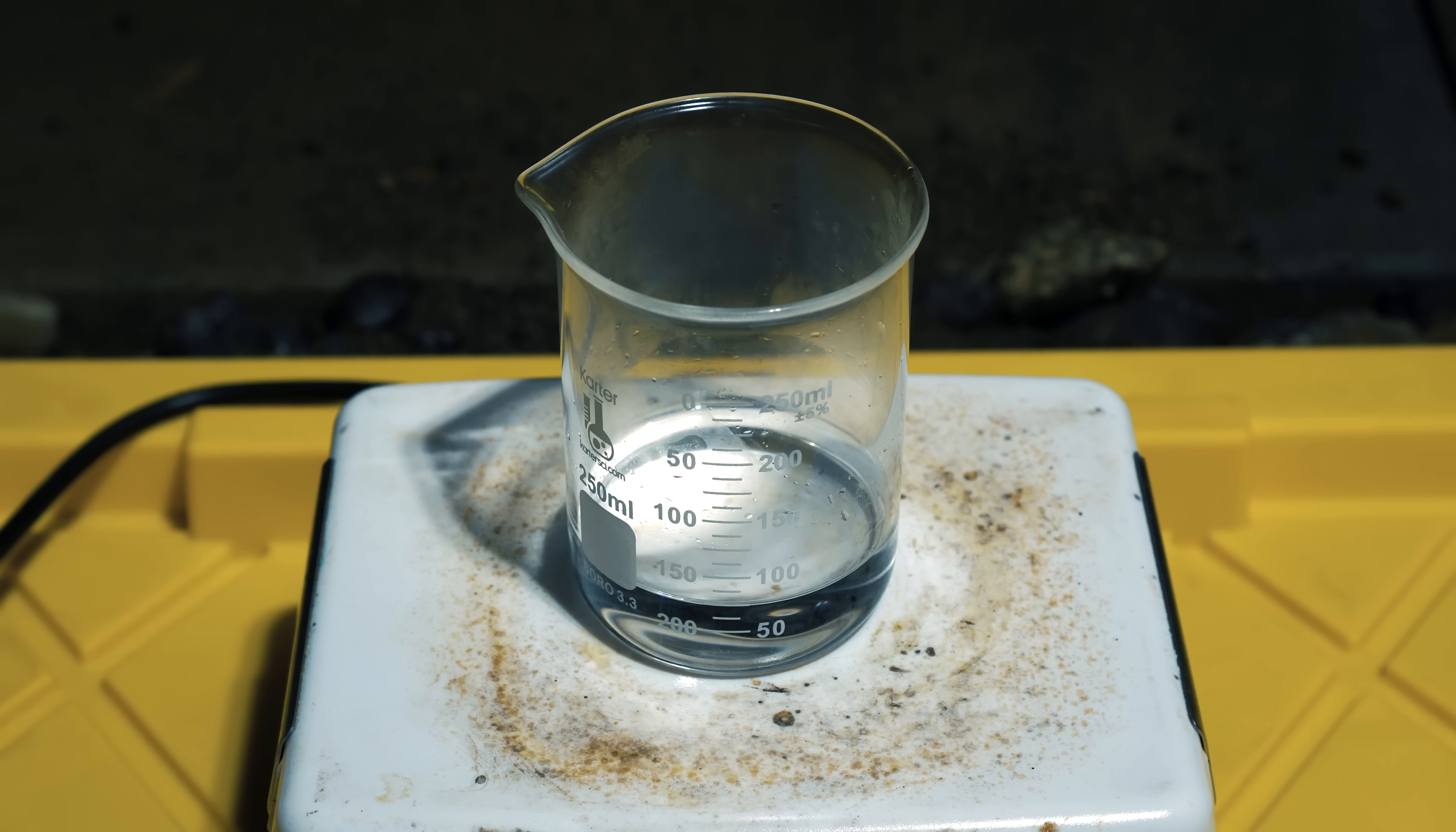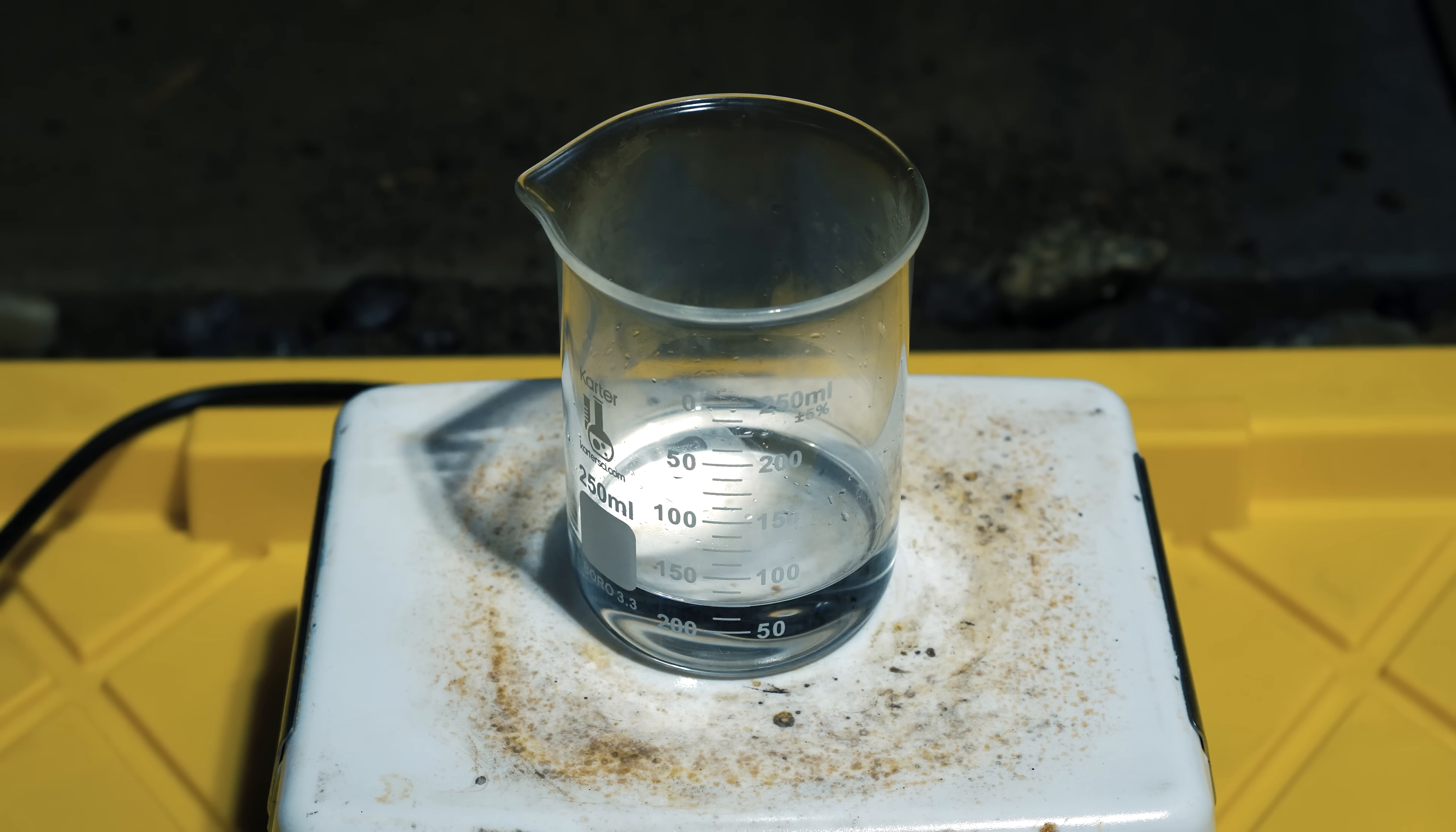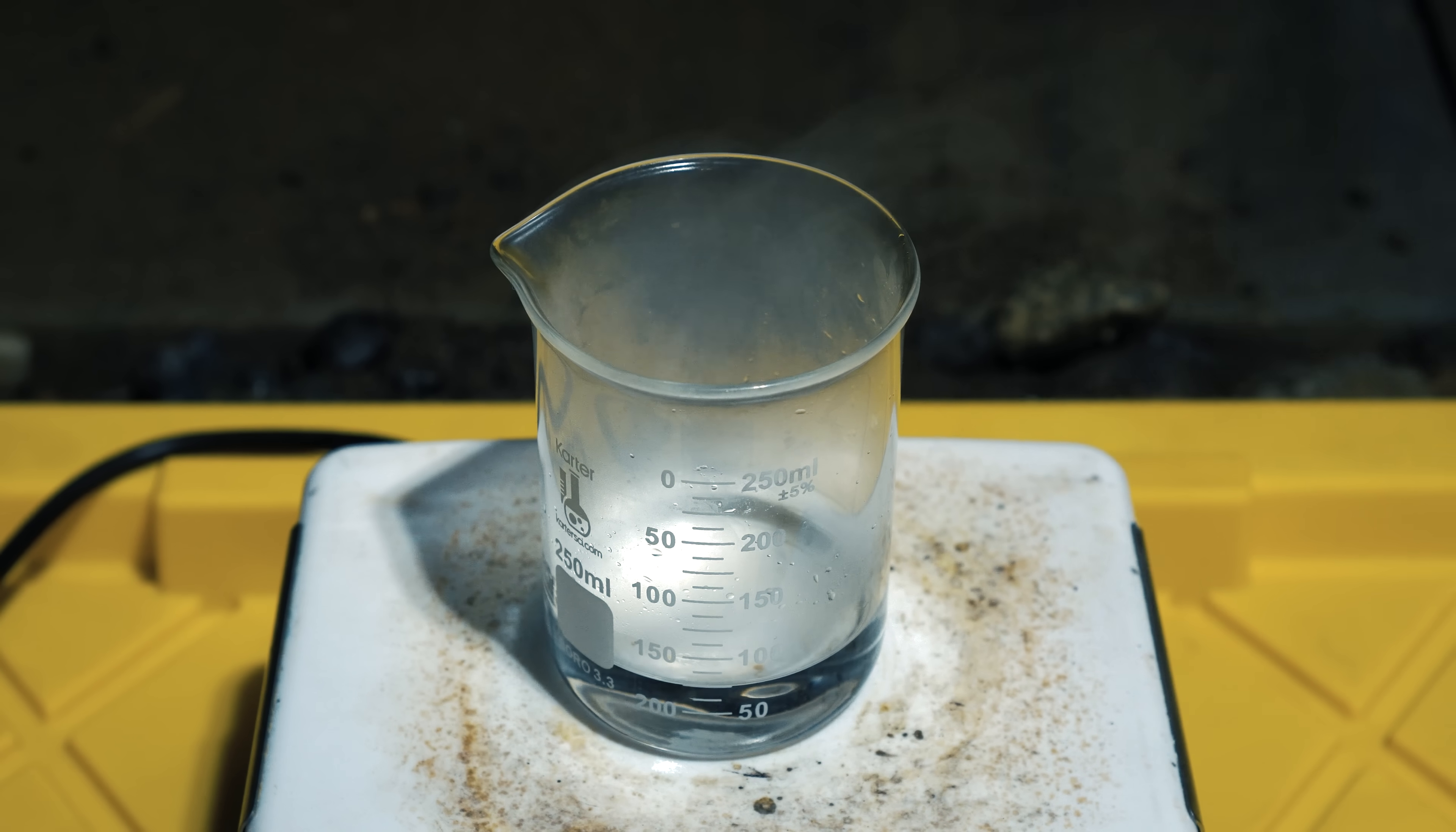All I had to do now was just boil off the hydrochloric acid and water. I decided to boil it off outside as I'm not that stupid and I won't do it inside. Once I boiled off the water and hydrochloric acid, it actually looked like a thick oil at the bottom and when I took it off, it solidified.